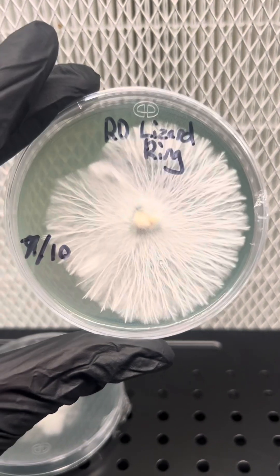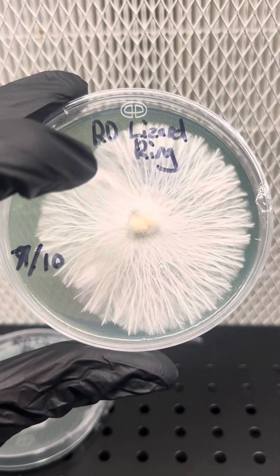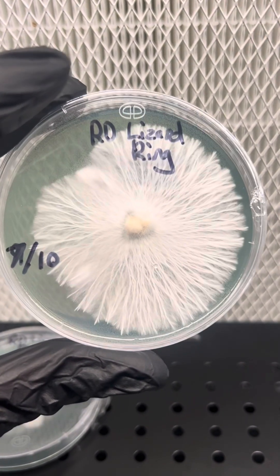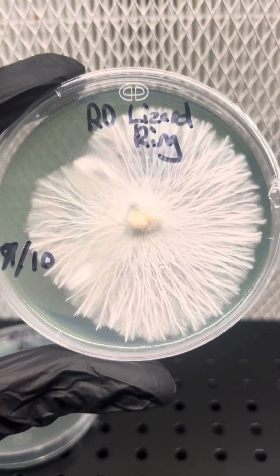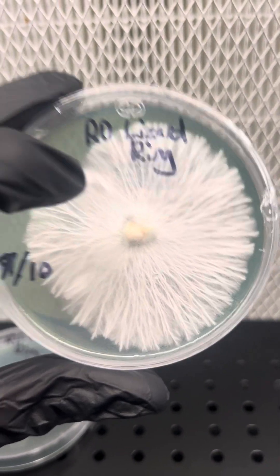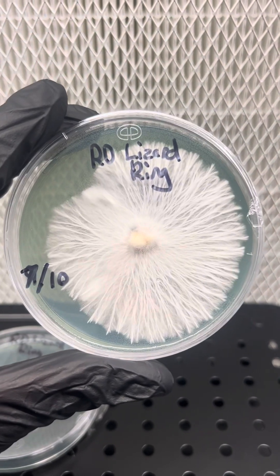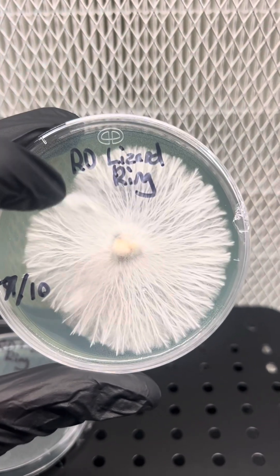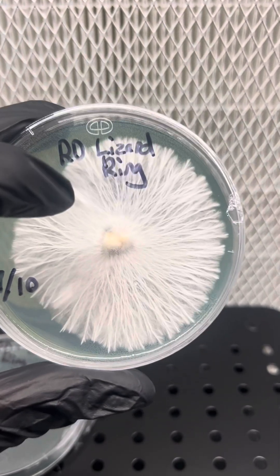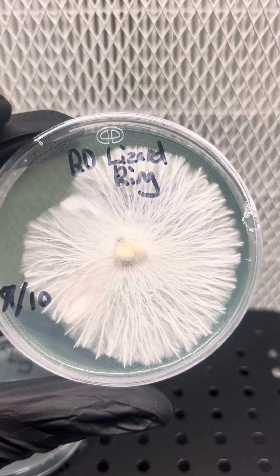Let's start with tissue samples. This is a great example of taking a tissue sample from a fresh mushroom, placing it on an agar plate, and getting amazing growth right off the bat — that doesn't usually happen. This is very close to a cloned mushroom, just by the way it is looking right now.